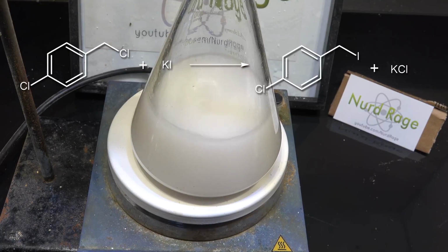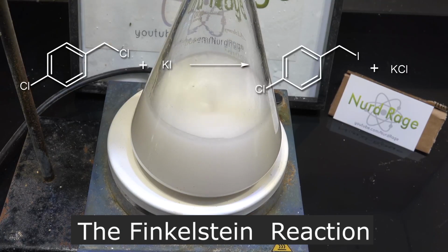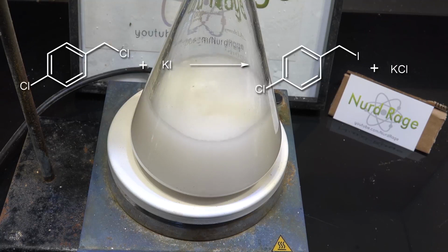It's such a useful reaction that it even has its own name, the Finkelstein reaction. Usually it's done with sodium iodide since that works even better than potassium iodide. I'm using potassium iodide because I ran out of sodium iodide. Now if you're wondering, the aromatic chlorine does not react because aromatic halides are not susceptible to SN2 nucleophilic substitutions.